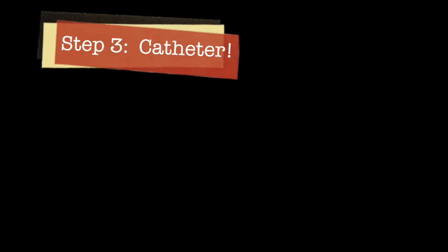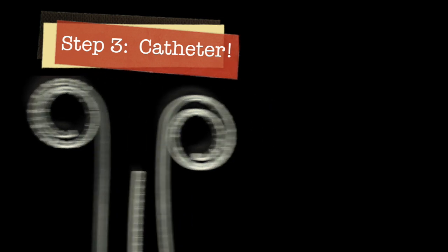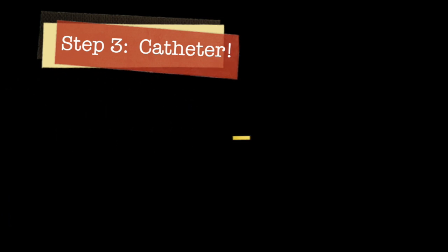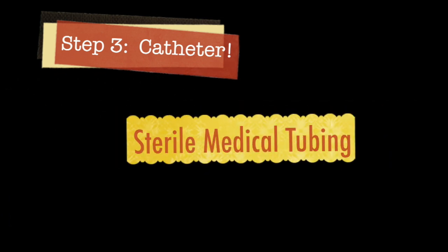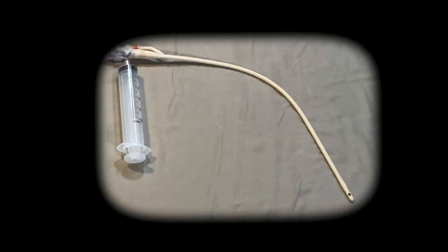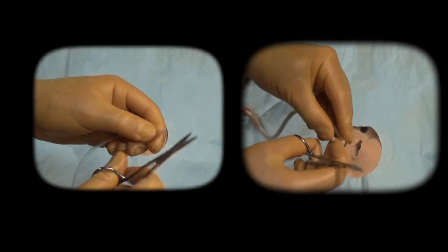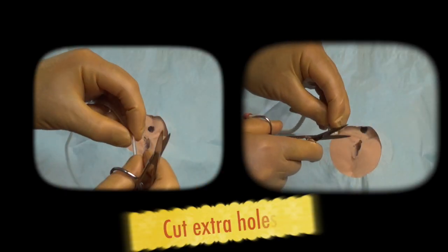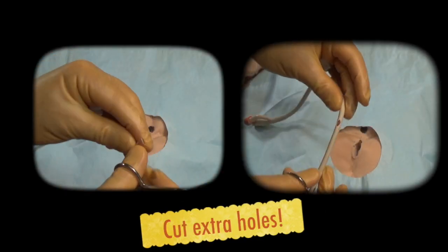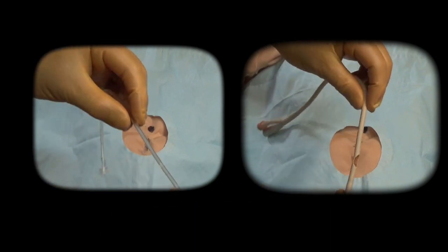There are special peritoneal dialysis catheters, but let's assume you don't have that kind of equipment. You can use any type of sterile medical tubing: pediatric chest tubes, IV extension tubing, Foley catheters, even NG tubes have been used. I recommend using sterile scissors to cut a few extra holes in your tubing so that dialysate can flow in and out more easily.